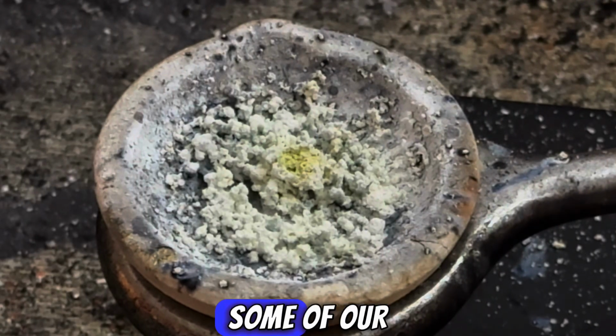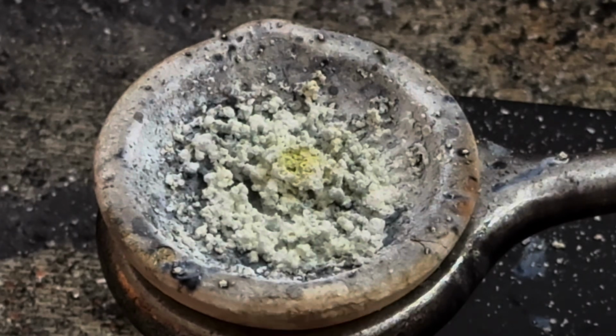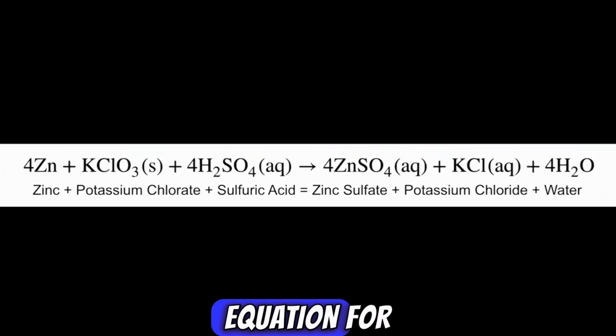And here you can see some of our products. We have some zinc sulfate and some potassium chloride. Here's the balanced equation for this amazing single displacement redox reaction.